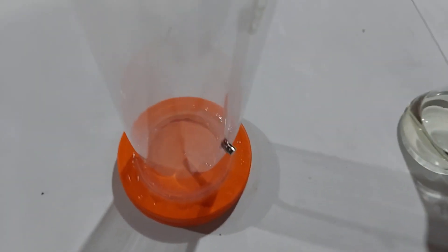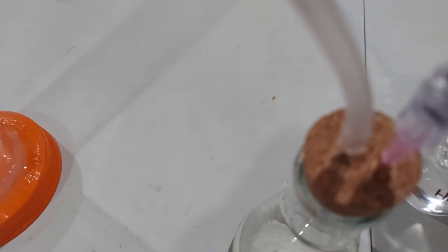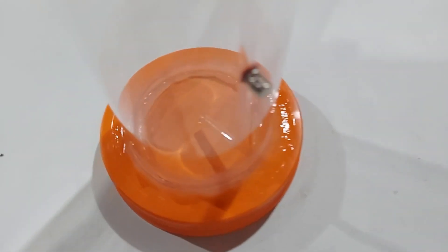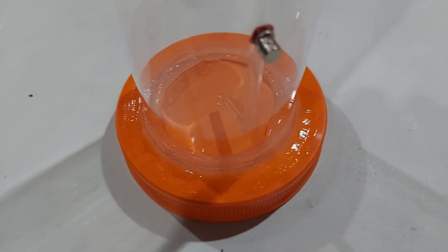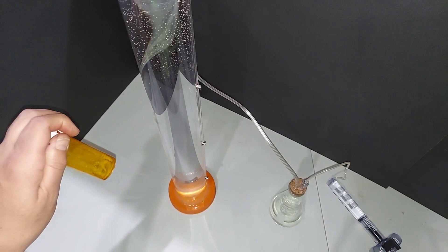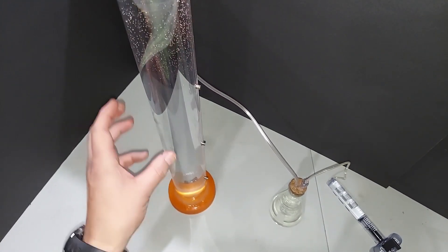Here's the final setup: the glass tube is in the polycarbonate tube, sealed, and it needs to be filled with water. Over here is the flask with the bleach already in it. The chlorine gas will be exiting through this tube and going down the glass tube to the bottom where the calcium carbide will be. With this full of water, and at the very end the six molar hydrochloric acid will be dripped in — chlorine gas meets acetylene gas and we'll watch the explosions. I've got my calcium carbide ready to dump in, with about three quarters of a gallon of distilled water.